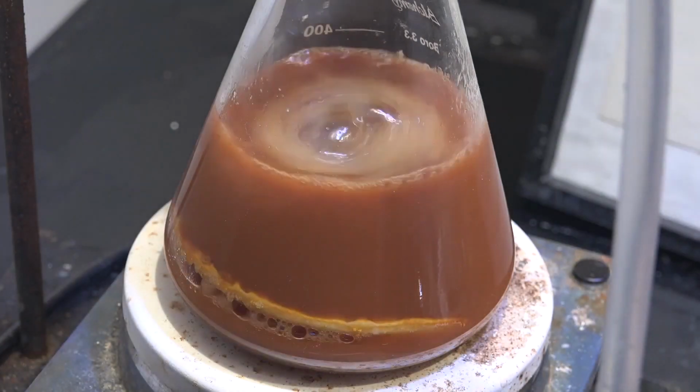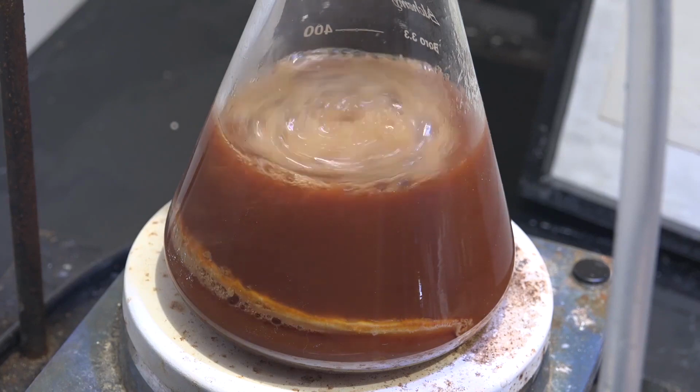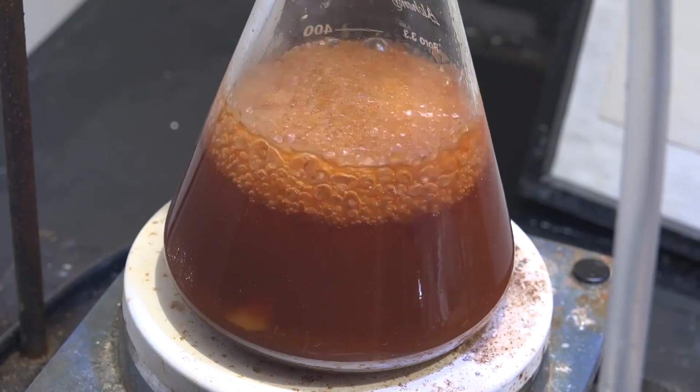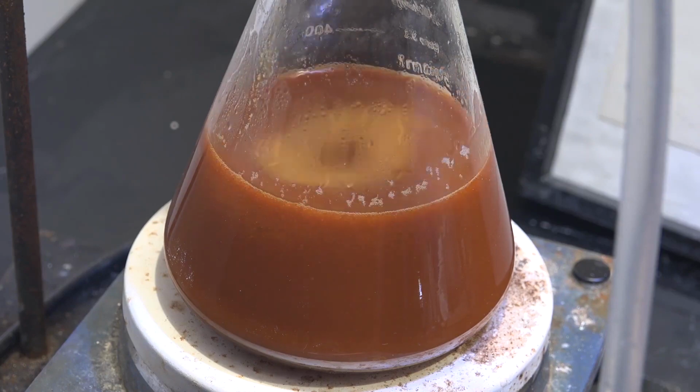Looking back, I forgot to break up the cake of sodium methoxide first, but eventually with enough stirring, it'll break up on its own. Now as it runs, it may foam up. Adjust heating and stirring to keep foaming under control, but try to keep it as hot as possible. Anyway, keep heating for 2 to 3 hours. Then turn off the heating and let it cool.